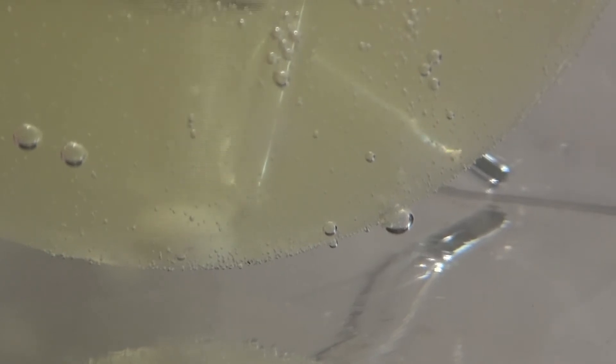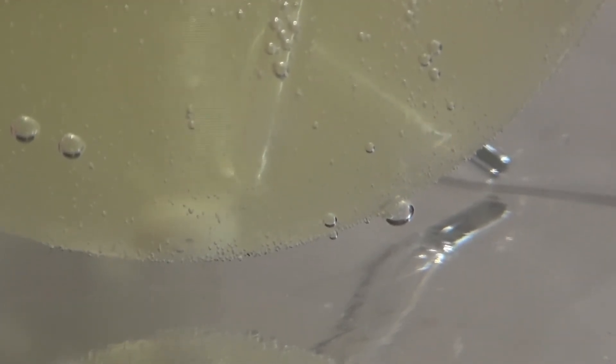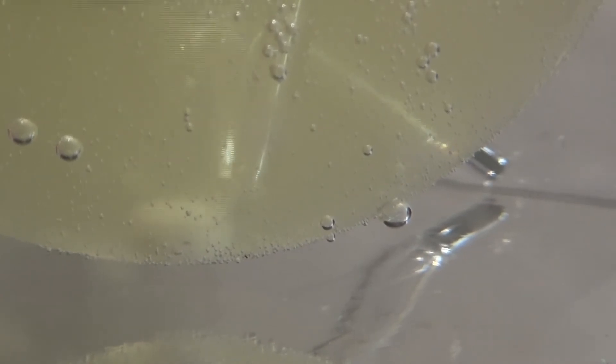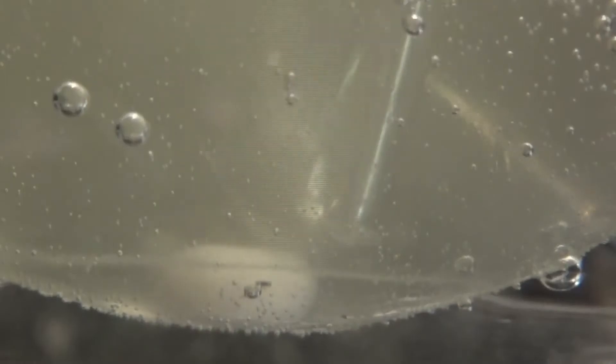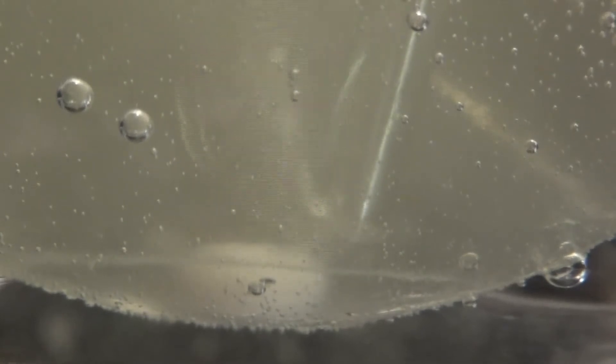After the chlorination has finished I simply reduced the volume by vacuum distillation to get rid of excess water and ethanol. As seen here with the small crystals, the chloral hydrate has already formed due to the presence of water in the reagents.